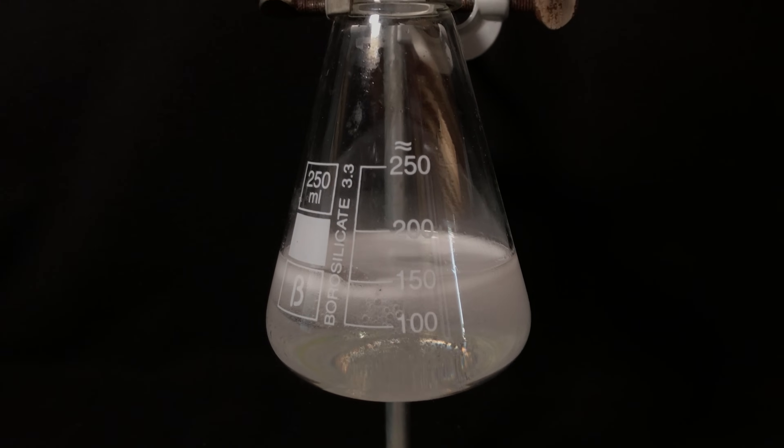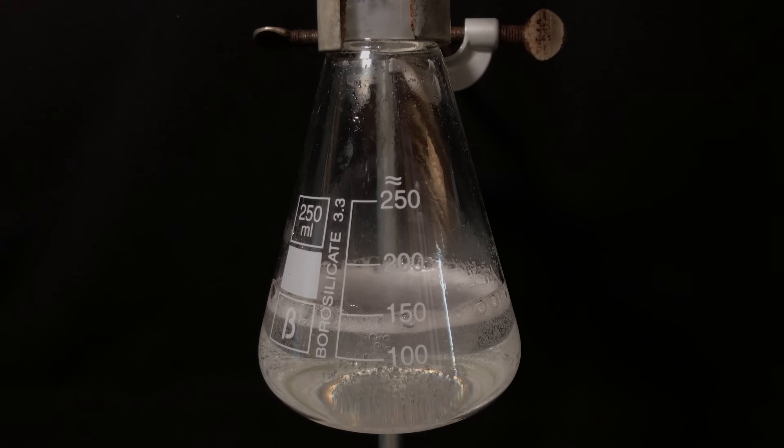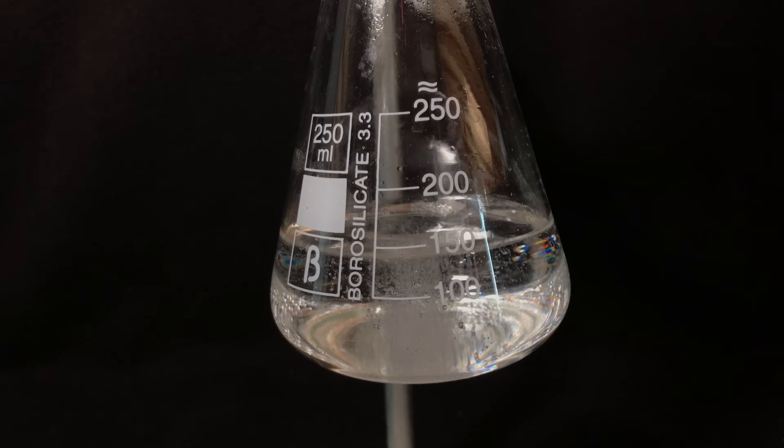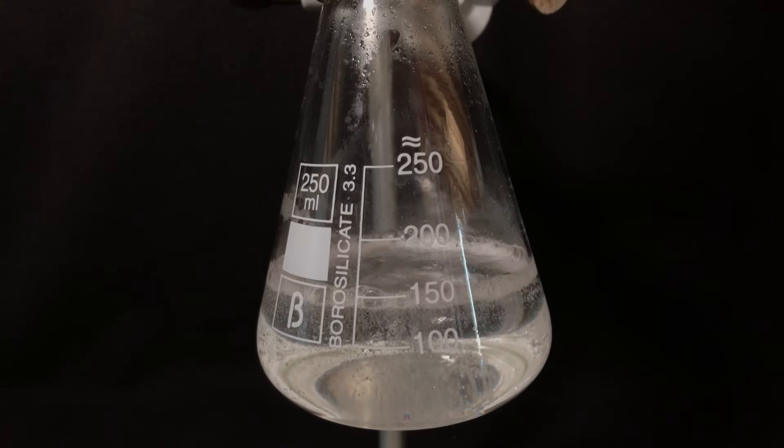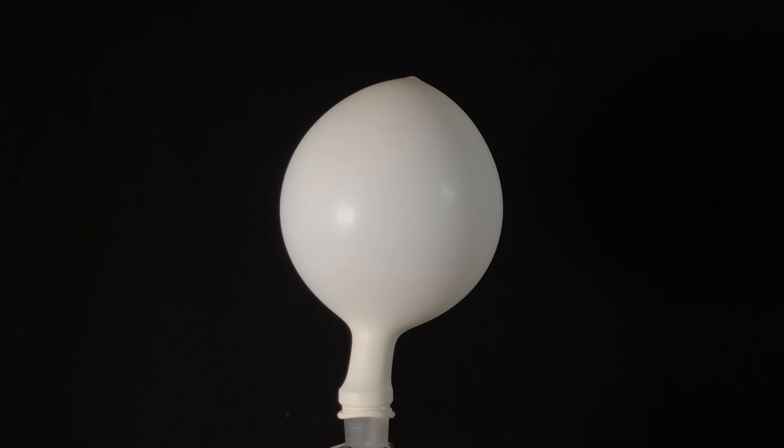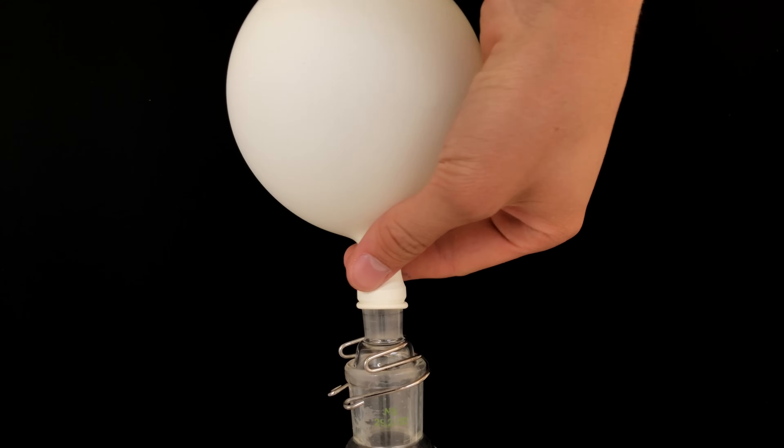For about half to one second after adding the nitrite solution to hydroxylamine, nothing happens. But later on a rapid gas production takes place and all of that stuff is laughing gas. After adding only 10 ml of the nitrite solution, the bottom flask was already getting hot so I decided to let it cool down before proceeding.